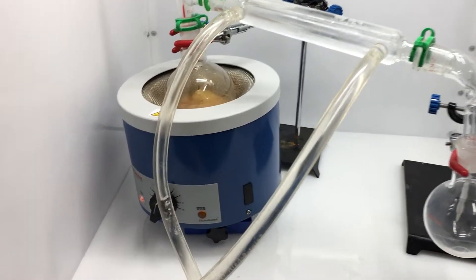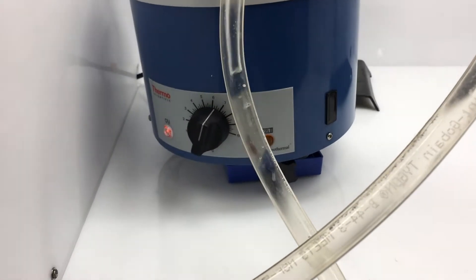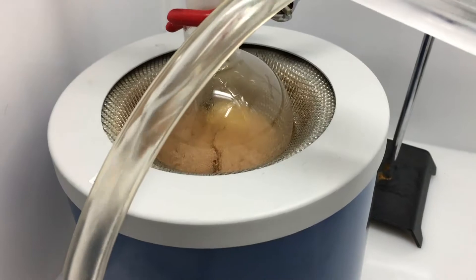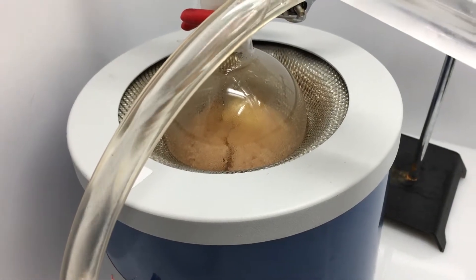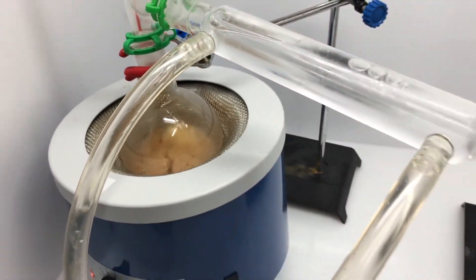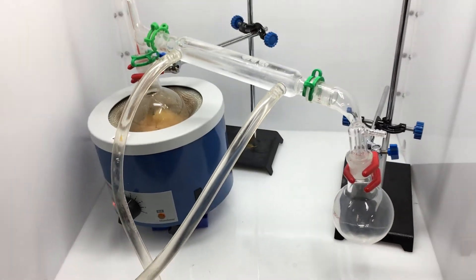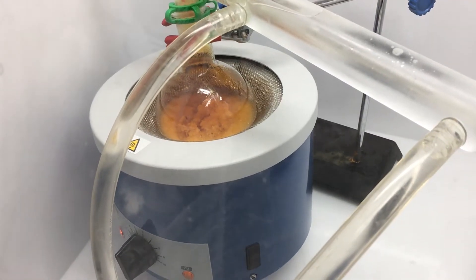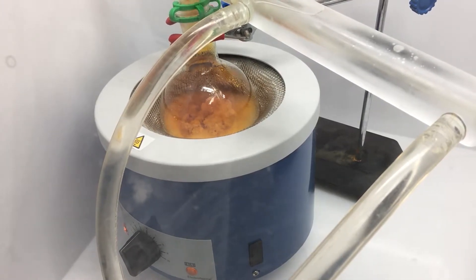Because the last time I did this I did it just with a tube leading outside, no fume hood at all. And there was a lot of leakage of nitrogen dioxide and nitric acid vapors, but gladly I was wearing a gas mask at the time so it didn't harm me at all. And I did make sure to wear a gas mask here if I did anything when taking it apart. Just a good idea to be safe.